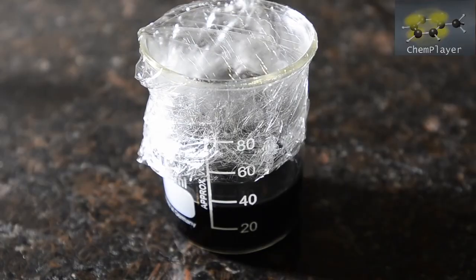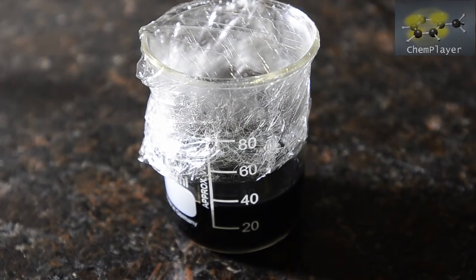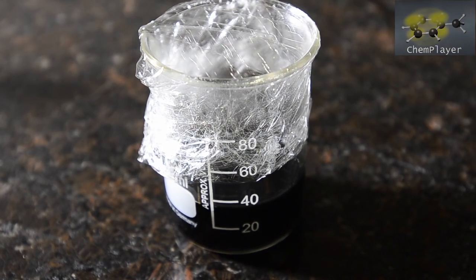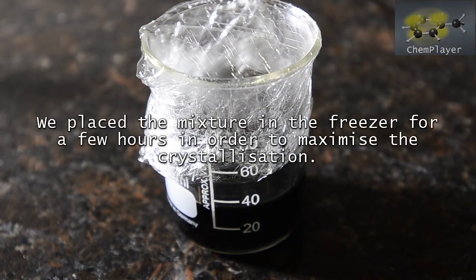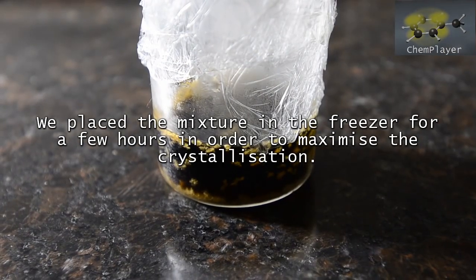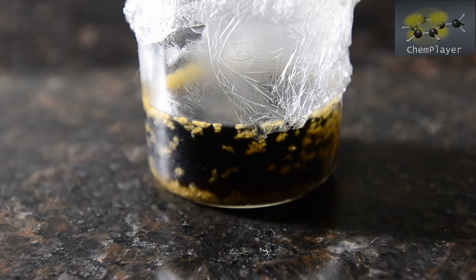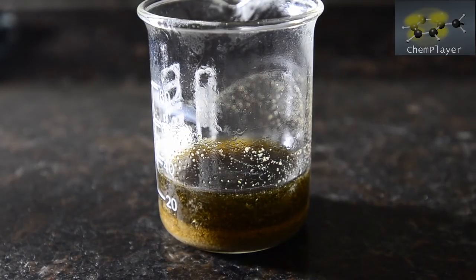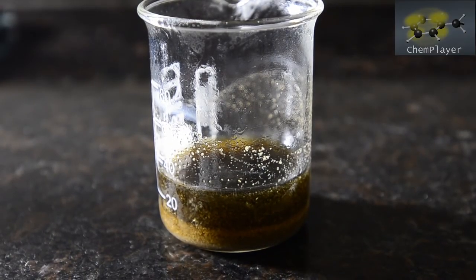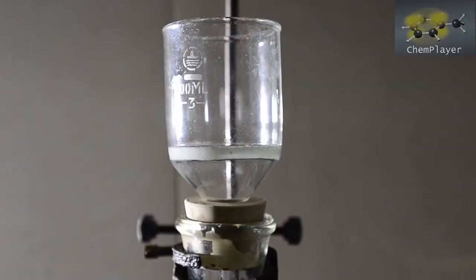Okay, we've covered this up and we're going to chill down now in order to see if we can crystallize out the potassium benzilate salt, which should be present. This takes a few hours, so be patient. During this time you can see crystals growing in the mixture. Here we are after a few hours. A mass of yellow crystals. So we set out to filter these.